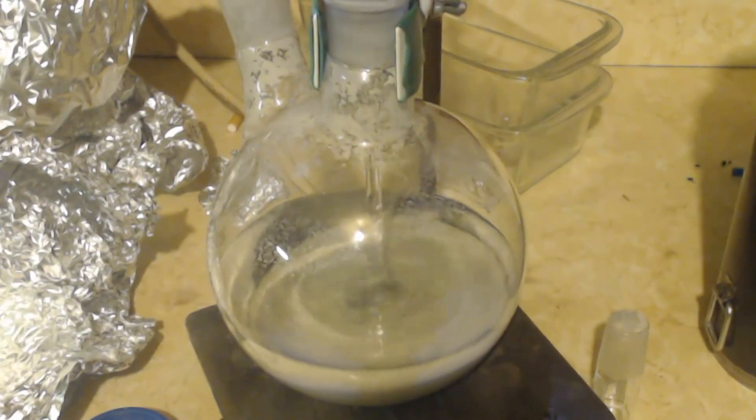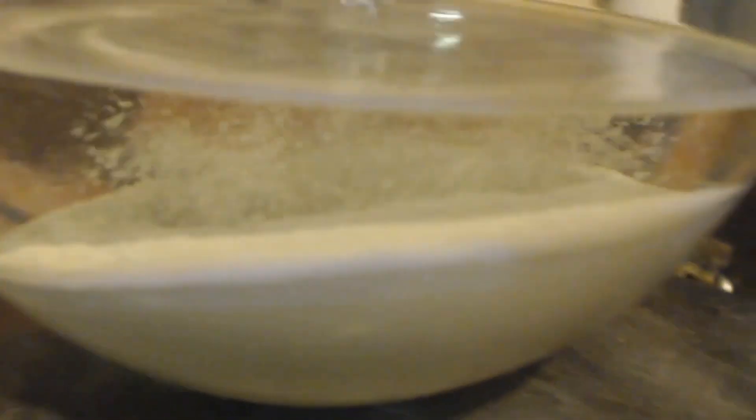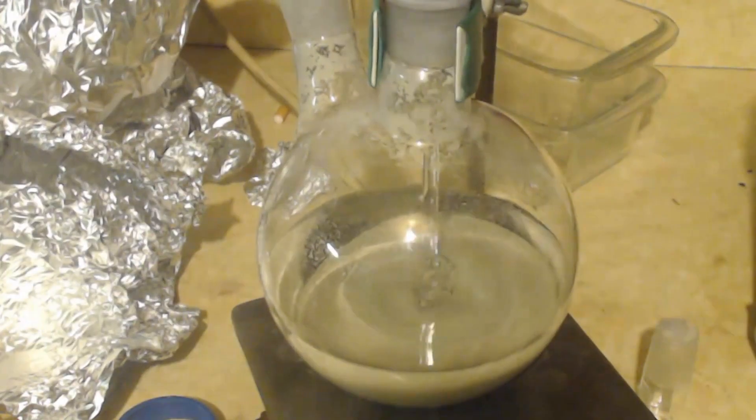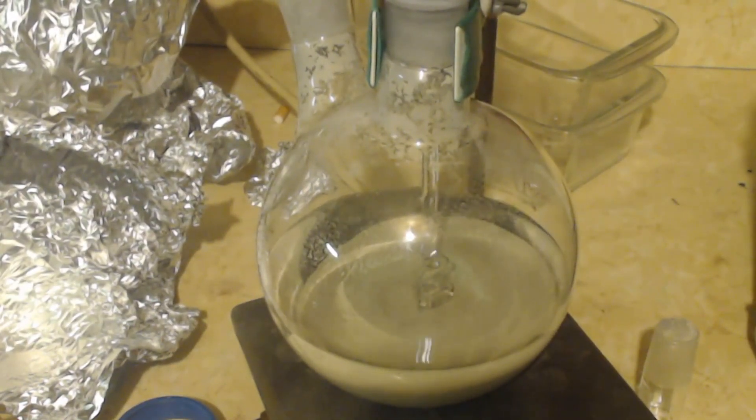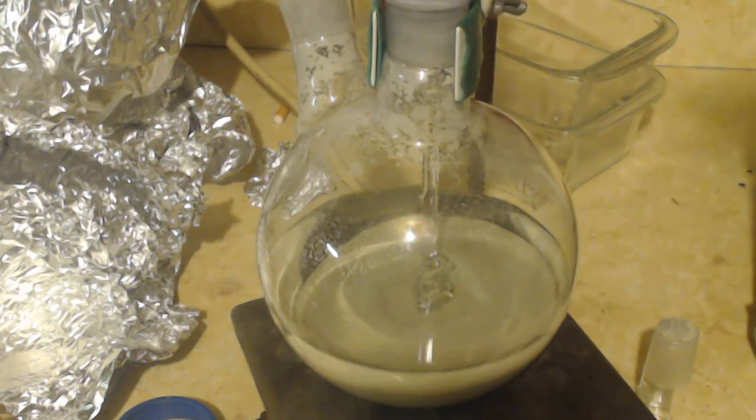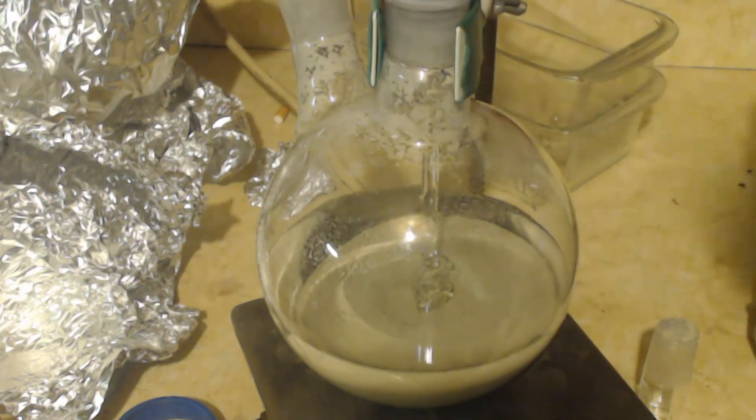So I let it stir for two hours, and then it got all wobbly and stuff. The apparatus was moving slightly back and forth and it all needed readjusting. So I just said screw it. I got two hours of stirring in. I just let it sit.